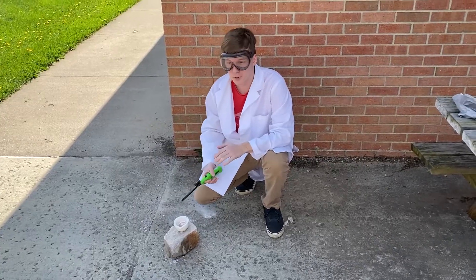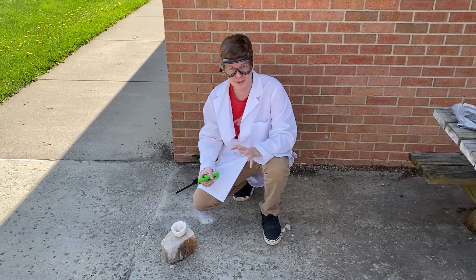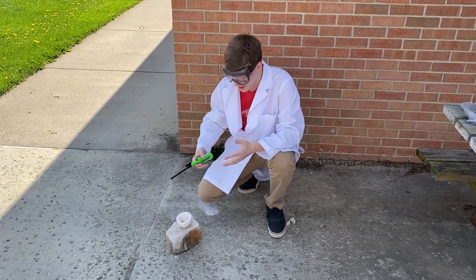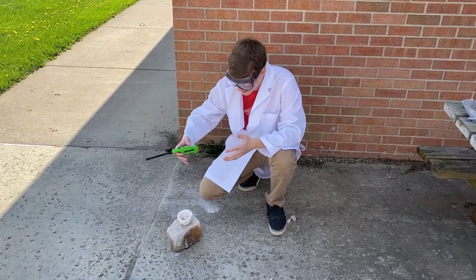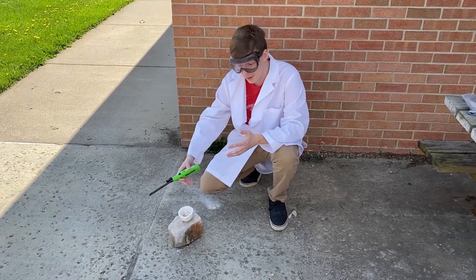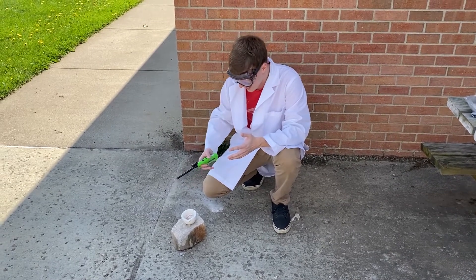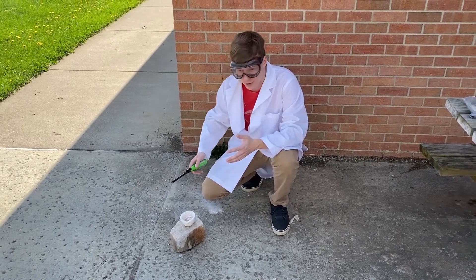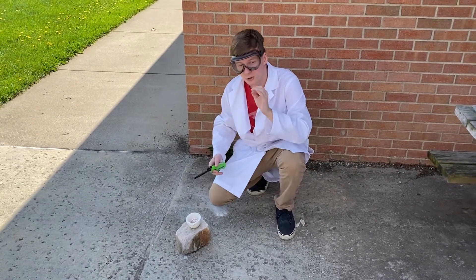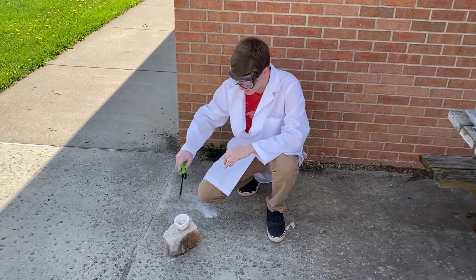Now, I hope you guys didn't think we were just going to do that once and call it quits. We made extra, might as well use it. So remember, this is our potassium chlorate and our sugar, and I've got a little bit extra here. This time I want you to pay very close attention to the color of the flame that is going to be produced.